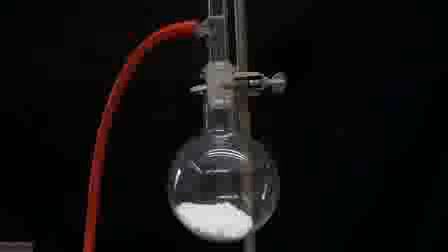You can see this time that when I dump it out on the piece of paper, we don't really have very nice crystals. The stuff that we had before is relatively pure and can be used in synthesis, but this stuff is extremely impure and has to be purified. To get the proper weight and yield of our product, I dried both the crude and the more pure methylamine hydrochloride under vacuum. Drying things under vacuum is pretty simple, and pretty much all you do is add it to a flask, pull a vacuum on it, and leave it for a little bit.